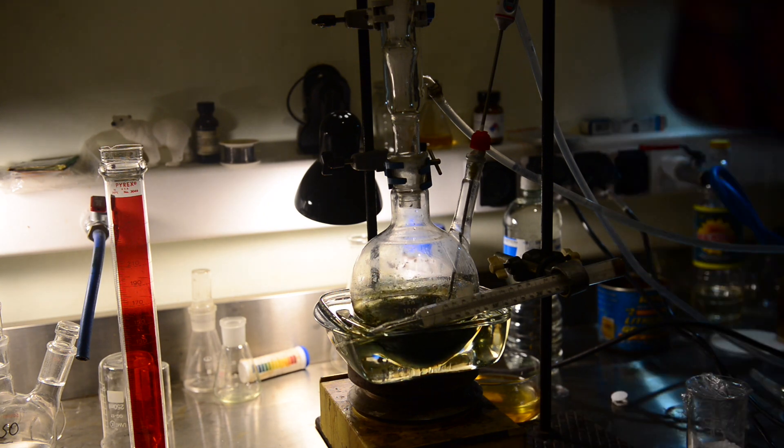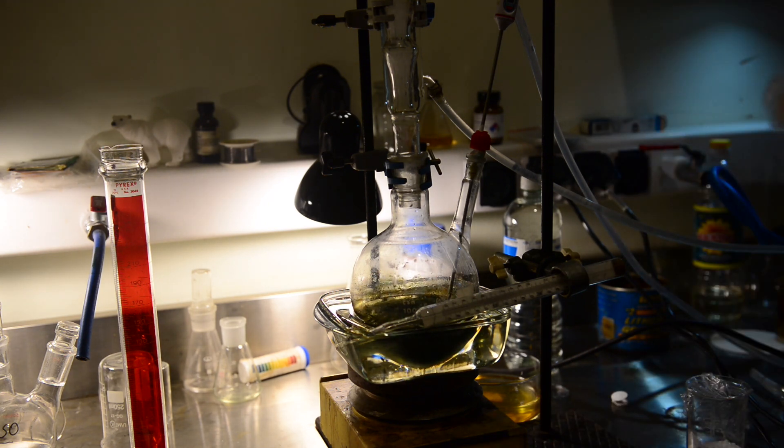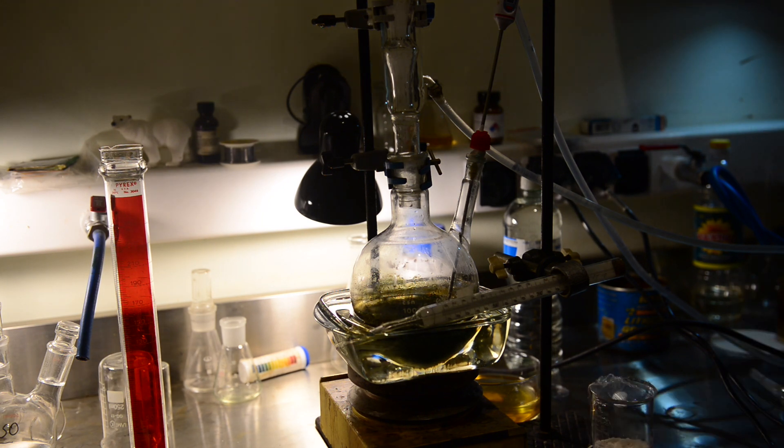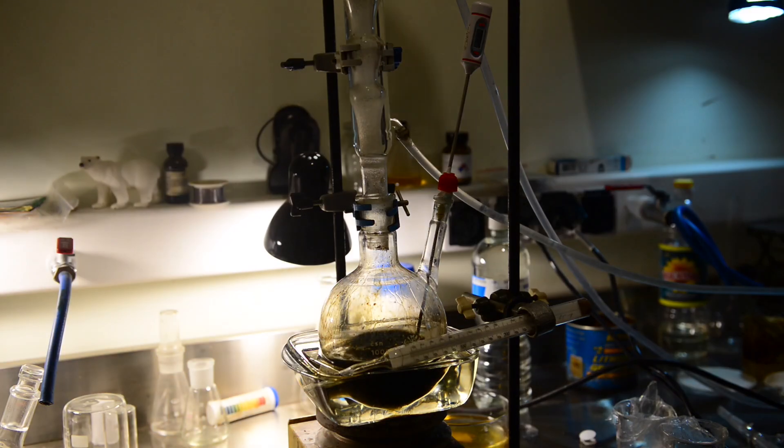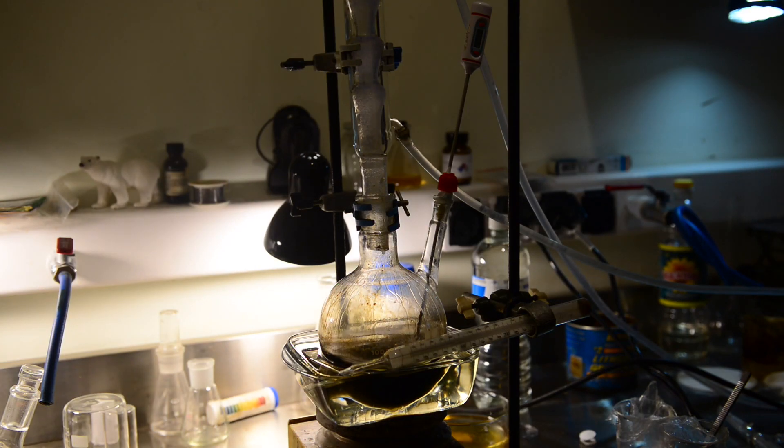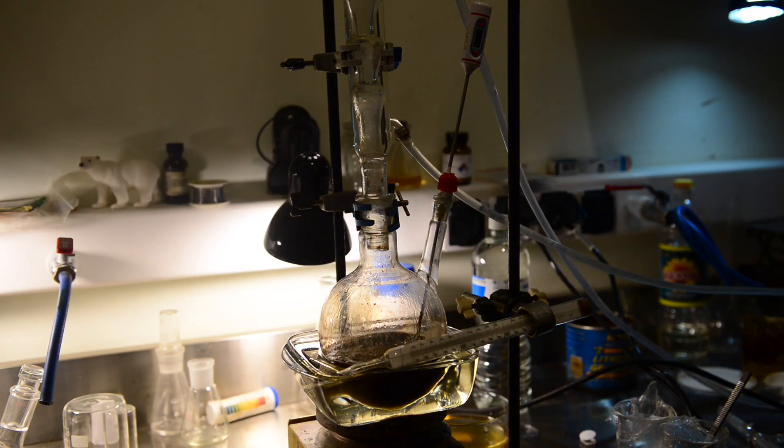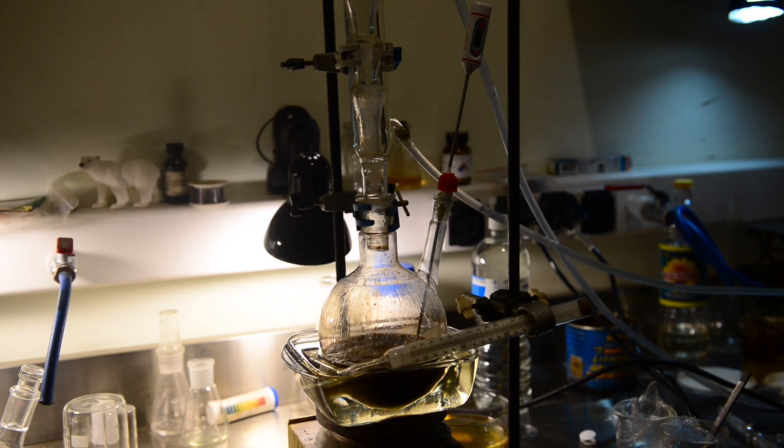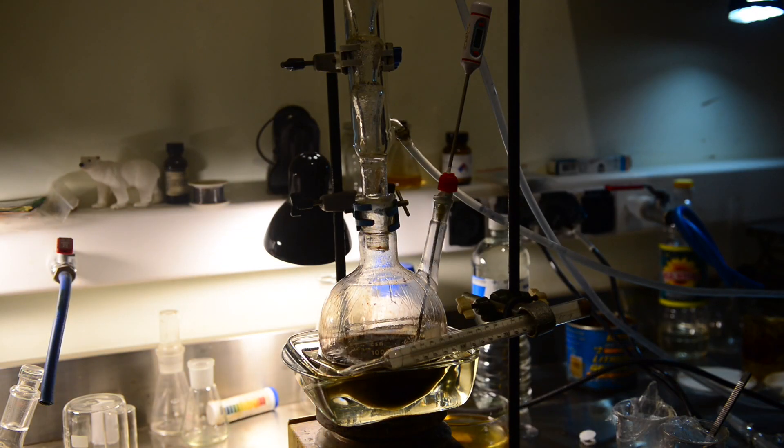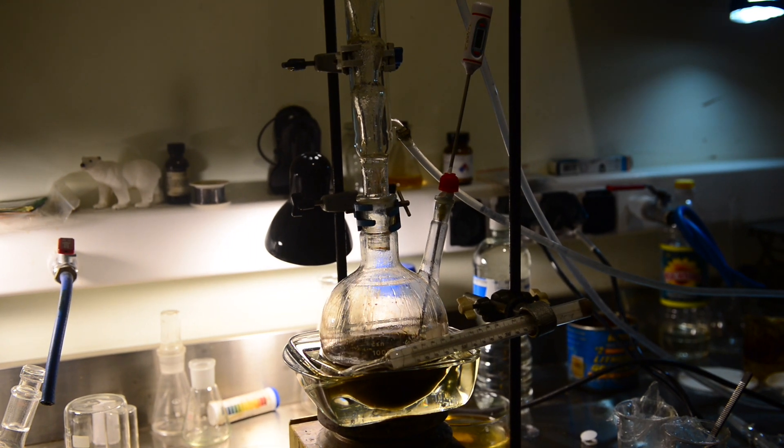Fortunately, with the increase of the temperature, the liquid has been getting more and more thin so it is easily stirrable. An additional 8.3 milliliters of DCM are added to rinse down the glass funnel and the exothermic reaction starts as expected. The condenser has hardly managed to contain the vapor. If we were doing the reaction on a larger scale, we would need a more efficient condenser. After the subside of the violent boiling, the oil bath temperature has been maintained at 110 degrees Celsius for two hours.